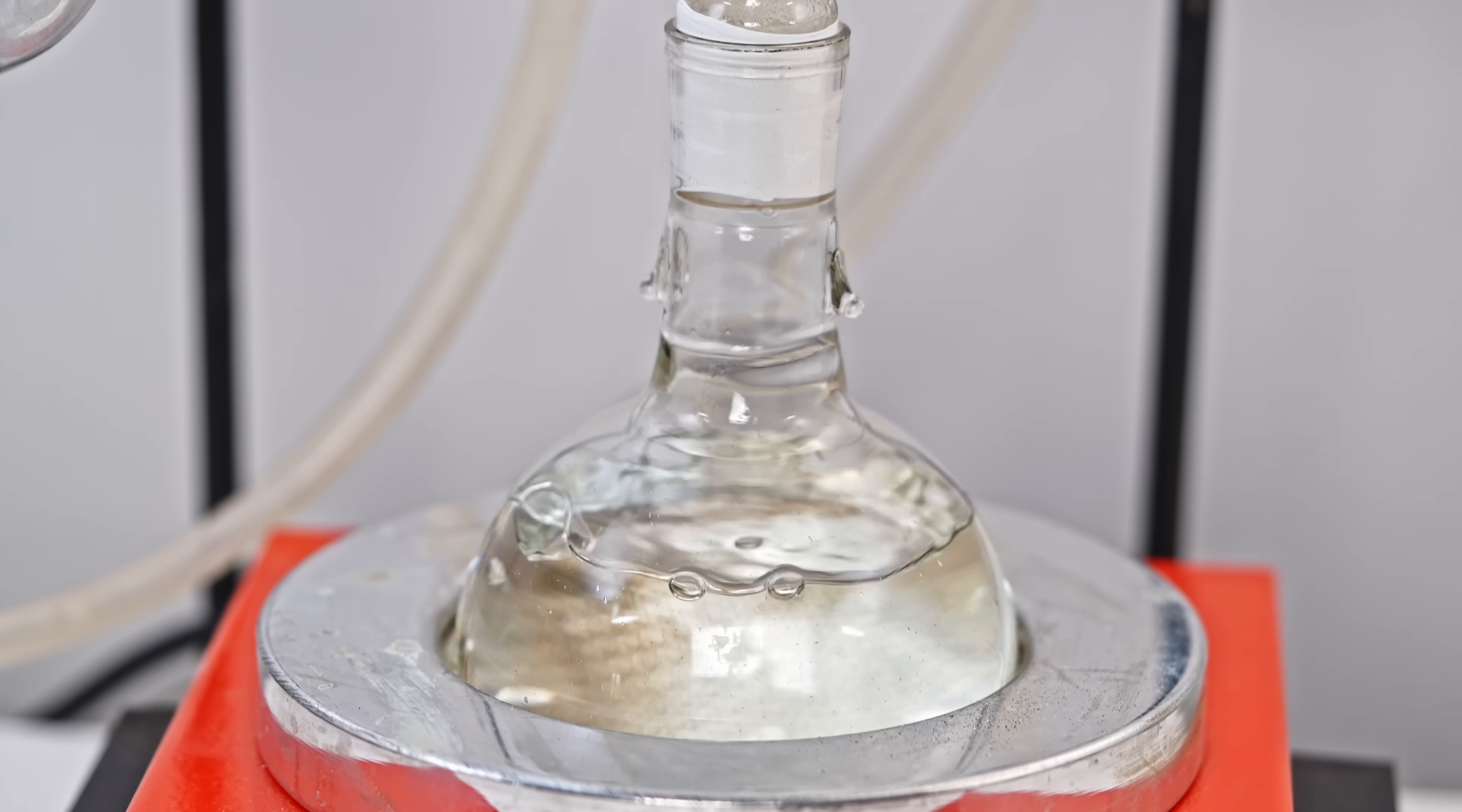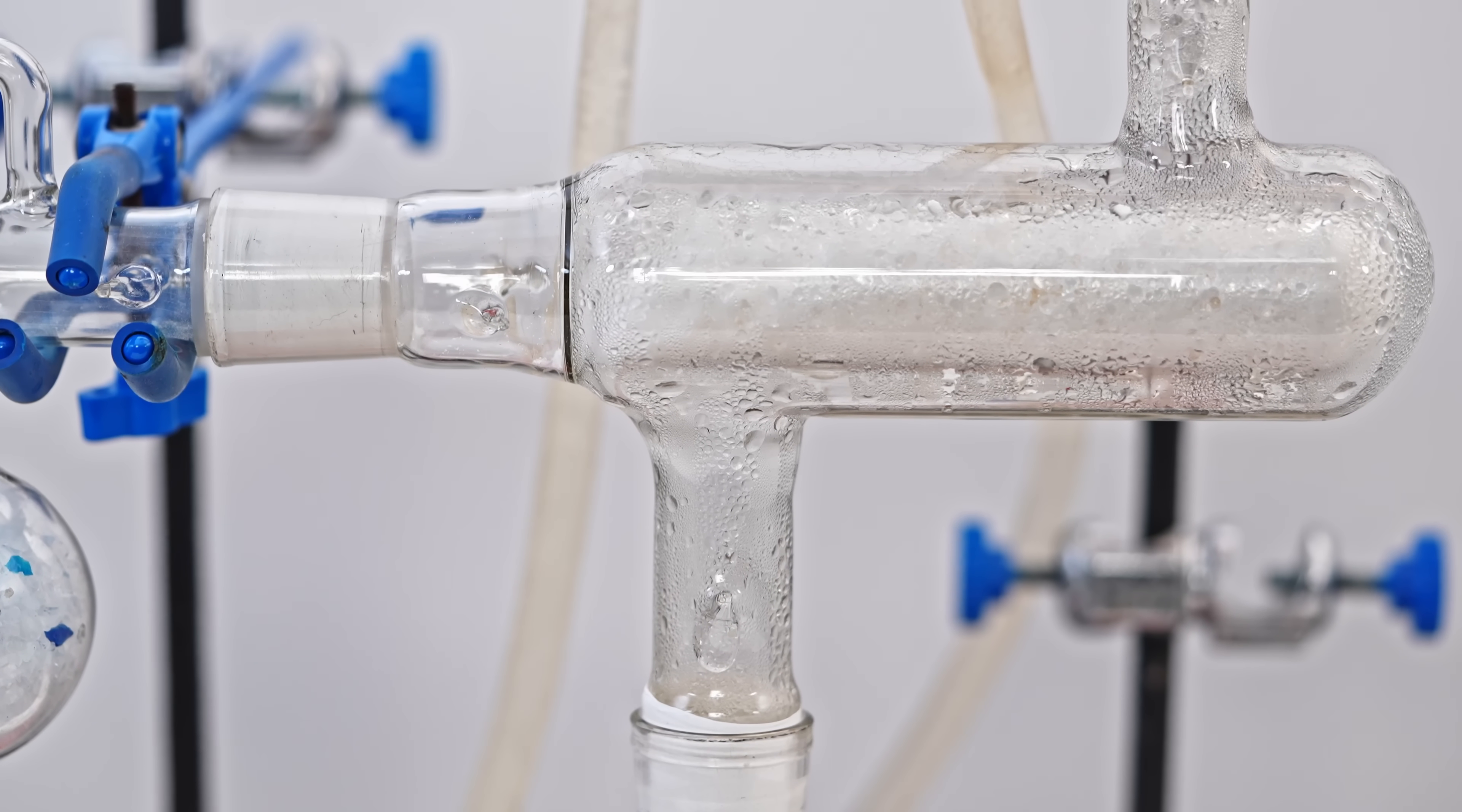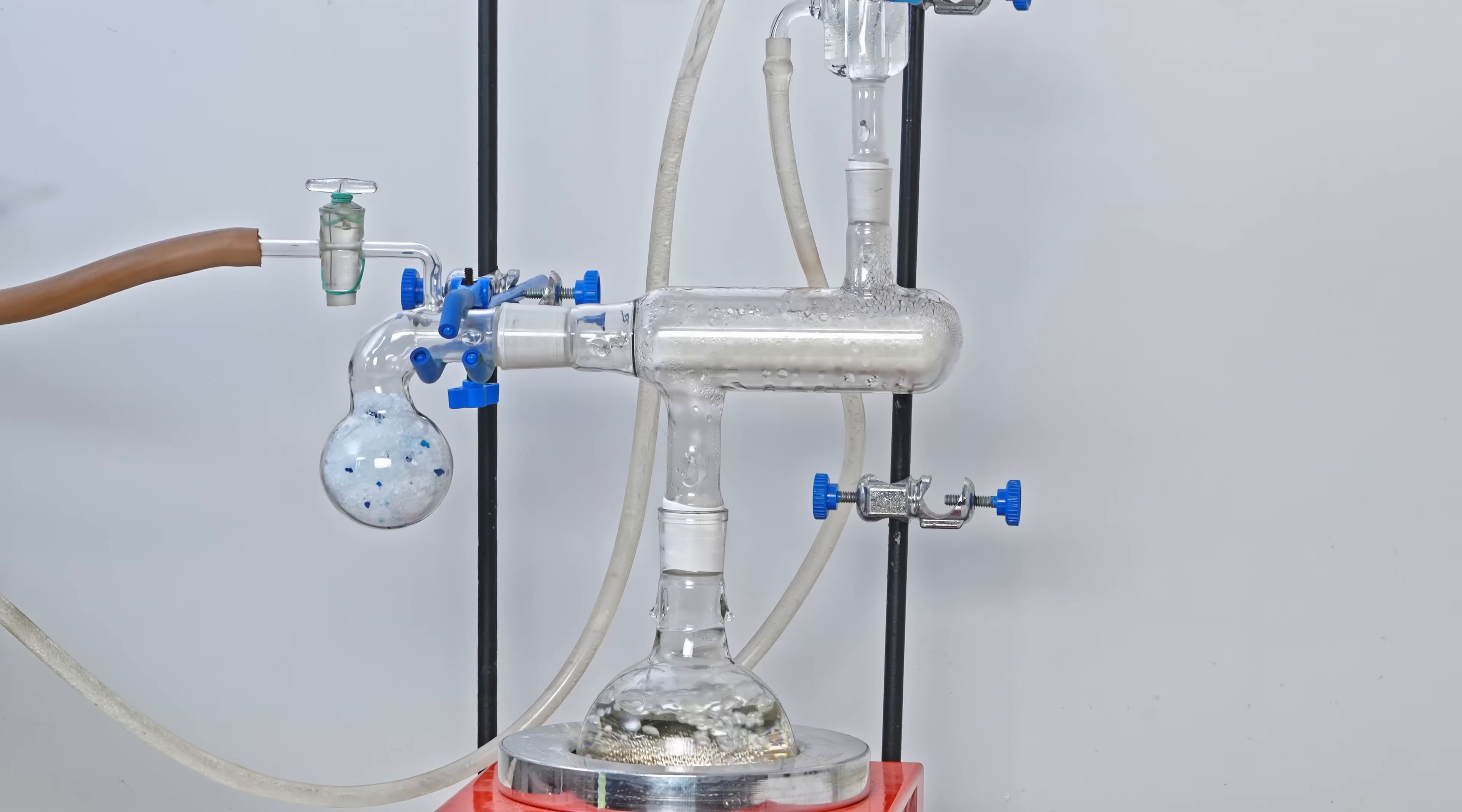Water is usually poured into the flask and brought to a boil. The resulting vapors condense on the outside of the tube containing the potassium cyanide, heating it and facilitating complete and rapid drying.